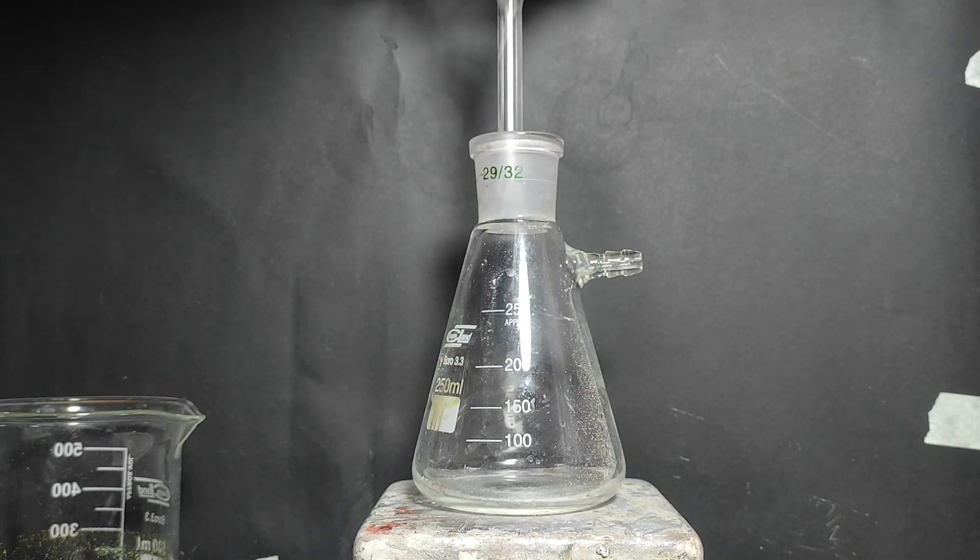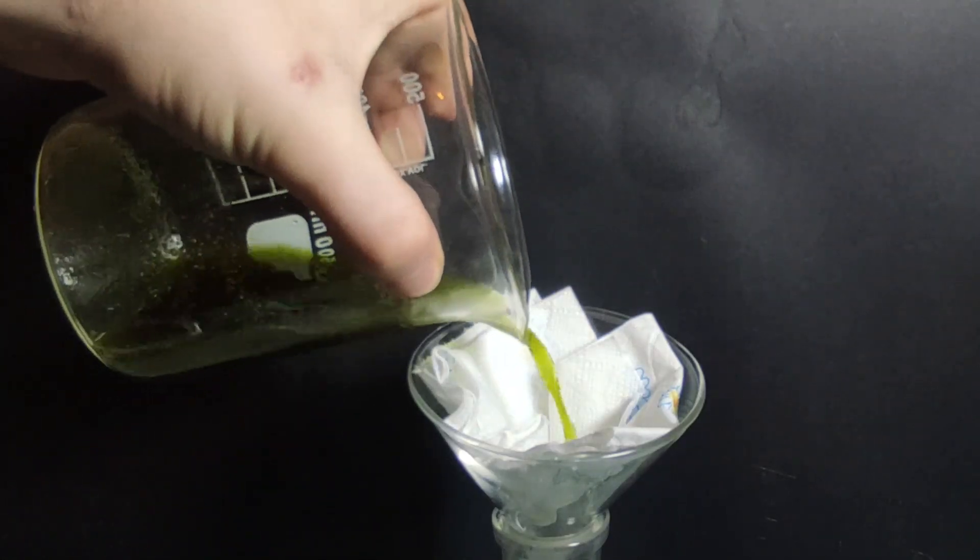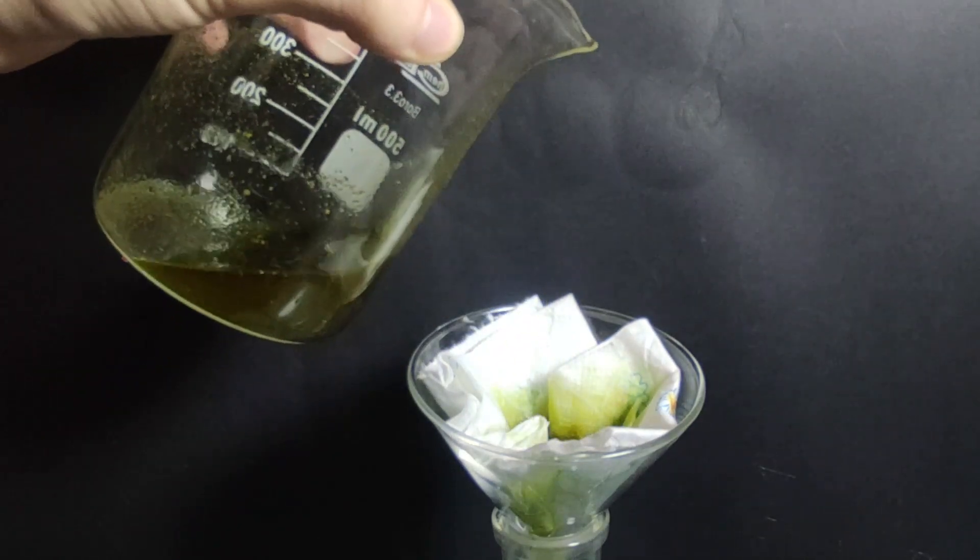Let's set up a filtration apparatus. The solution was poured through the three times stacked toilet paper. This step is done to remove the solid junk from the f***** extract.